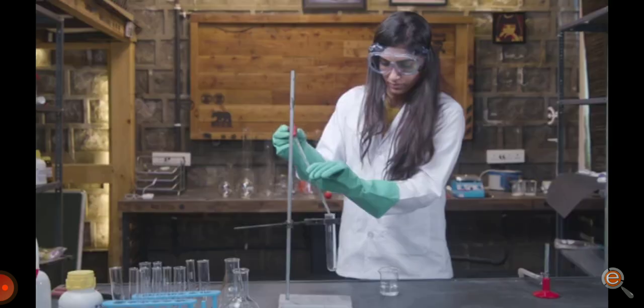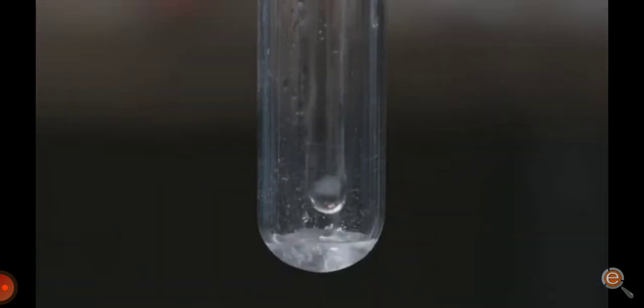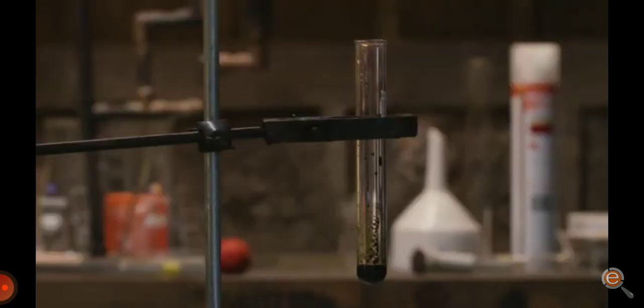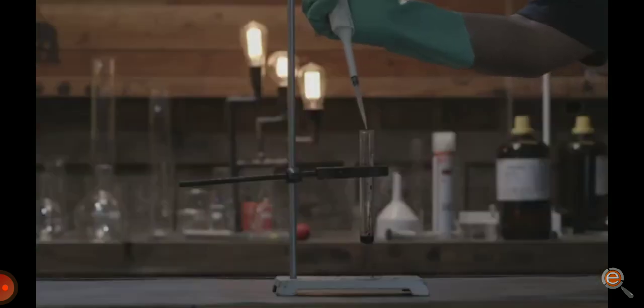Okay now, what is the point of burning if there isn't a pop to it? Time to grab the test tubes. Pour a bit of the same solution into a test tube, and yeah, don't hold it if you want to keep your arms and eyes intact. Just put it on a stand like this. Now, from a distance, pour in a few drops of acetone or methanol and watch it burn and pop like a tiny rave. Woo! This party is on.